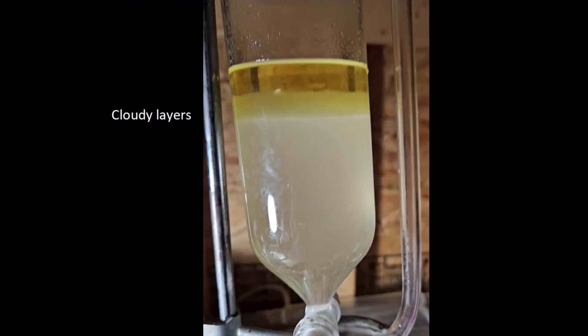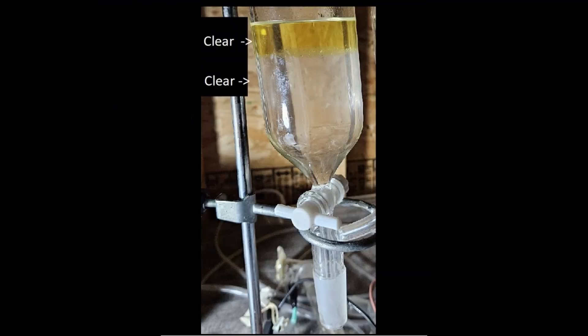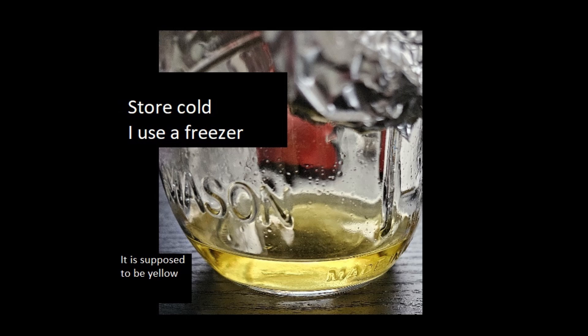I waited until the layers separated, then discarded the lower water layer. I did a wash by adding alkaline brine made with baking soda and table salt. I shook it up and let it settle again. The upper layer is noticeably clearer and we have a decent amount of yellow product. After that I once again discarded the lower layer. I put the isopropyl nitrite product into a tightly sealed container, protected it from light with foil, and stored it cold.